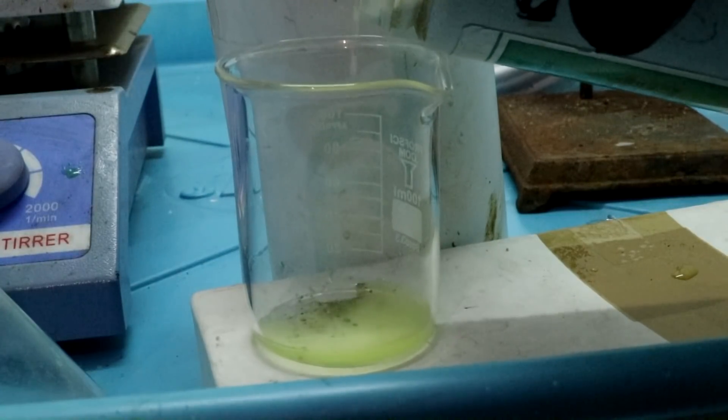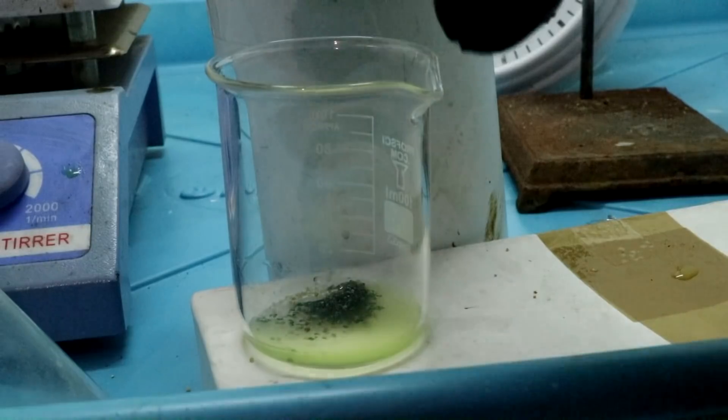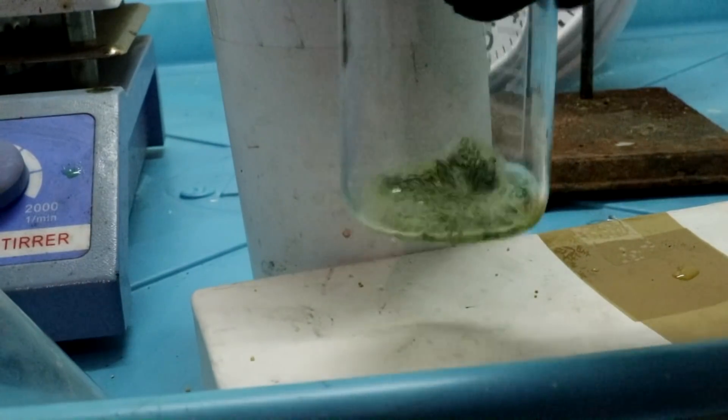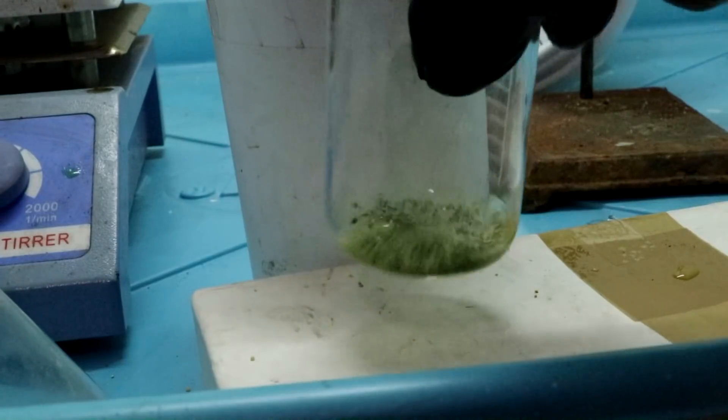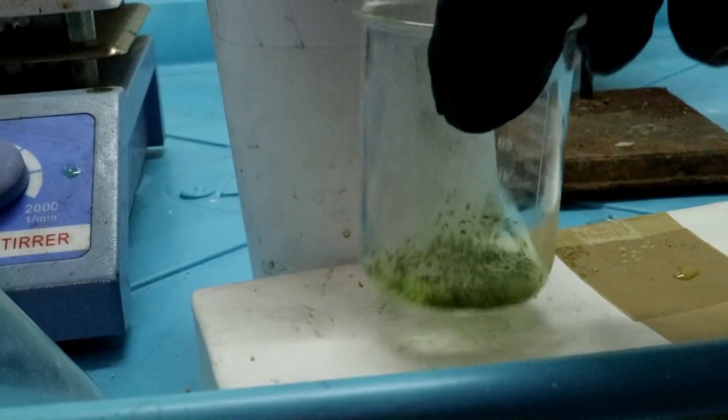That's just a source of iron ions. Okay it's gone a bit green. That's to be expected due to the excess alkali that we have in the solution. Let's get this mixed up a little bit here.